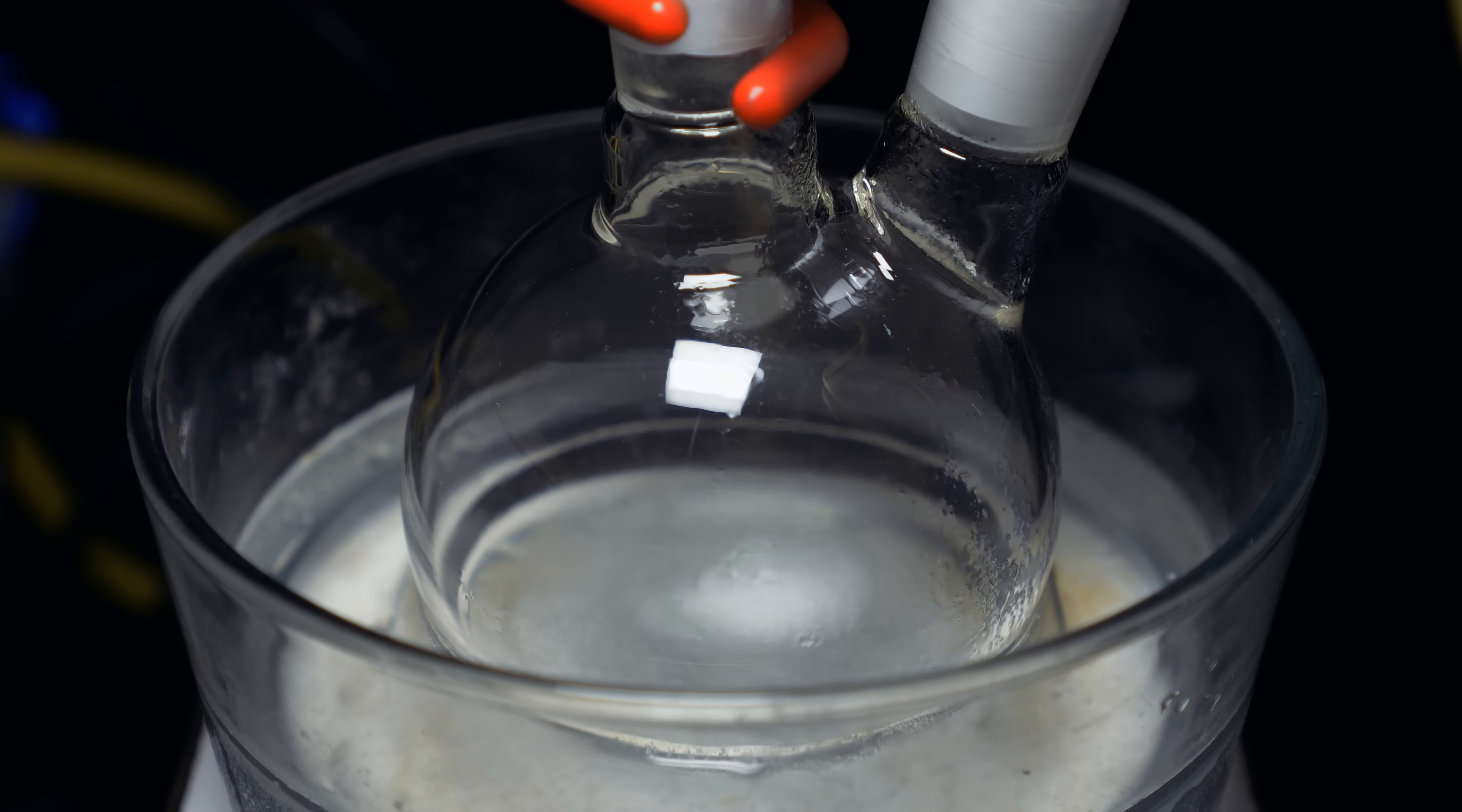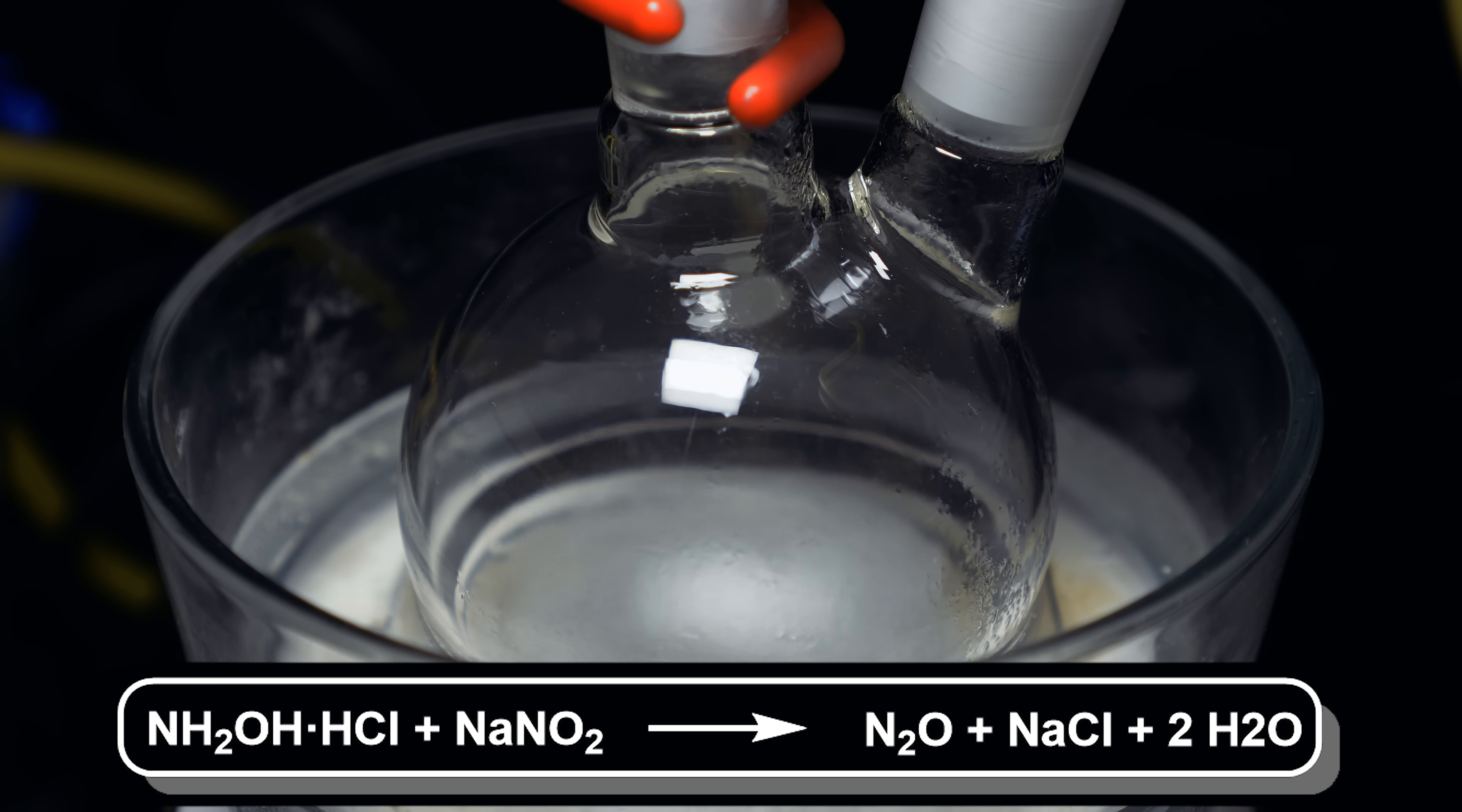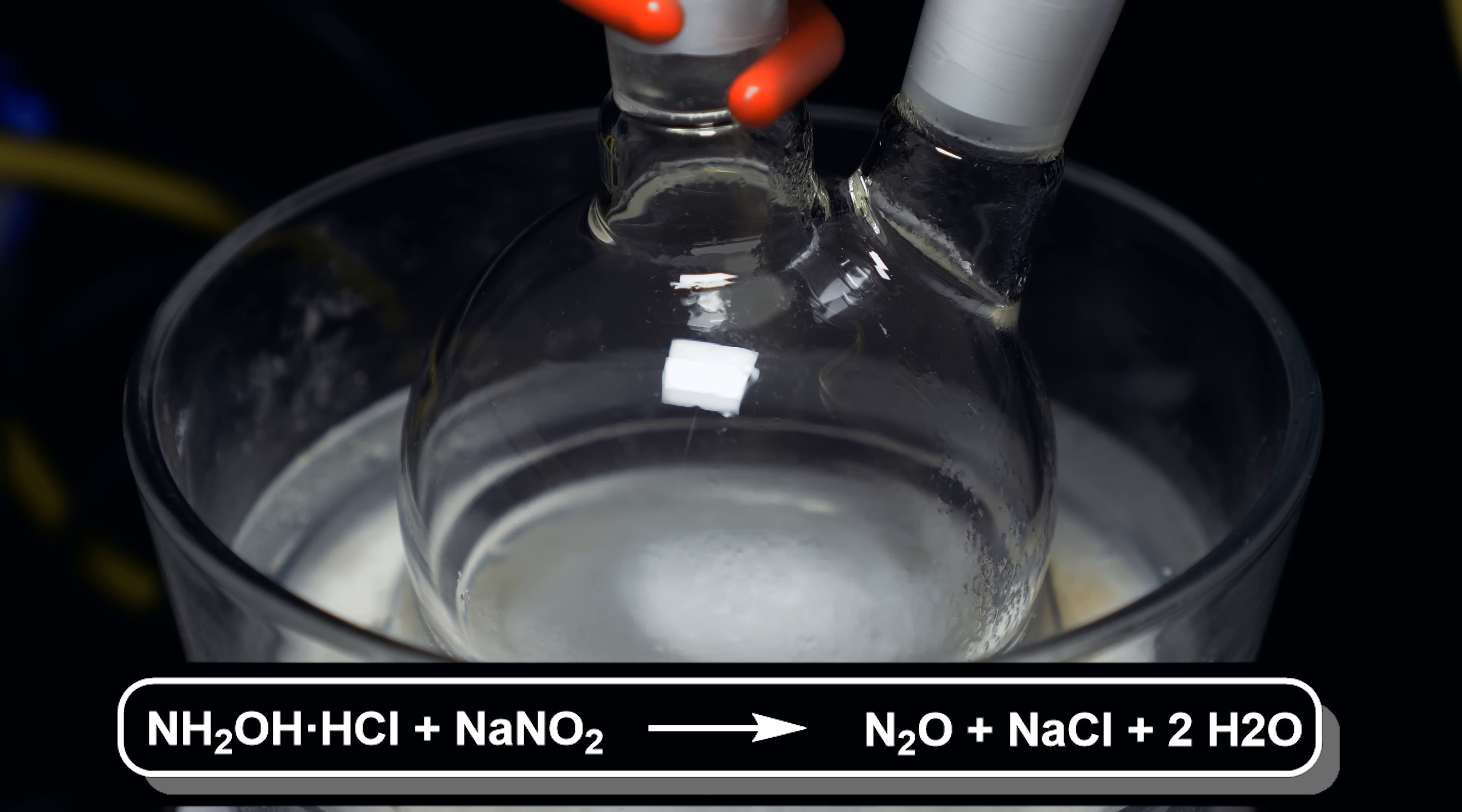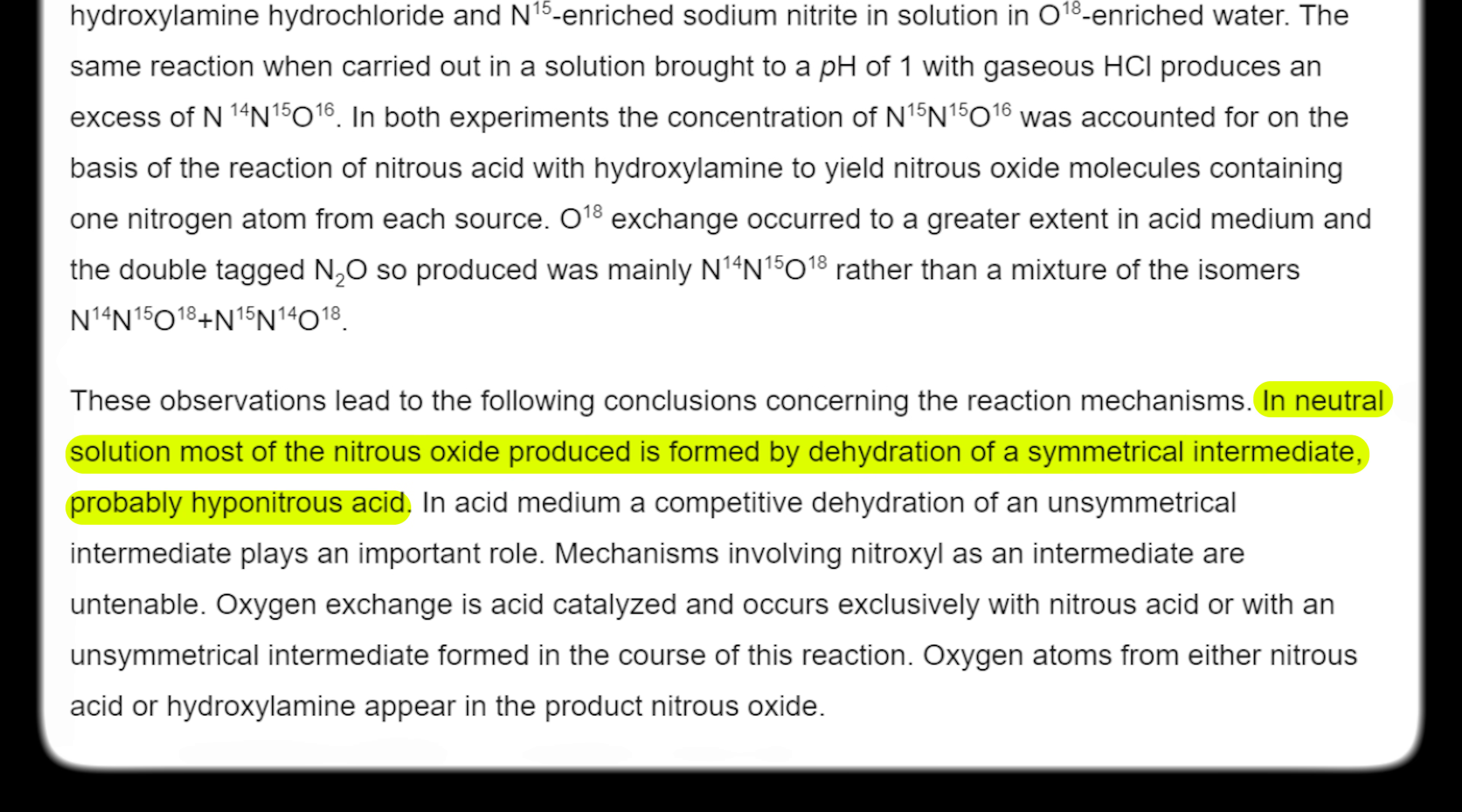Now, let's explain what's happening in this reaction. When the two solutions meet, hydroxylamine hydrochloride will react with sodium nitrite through a redox mechanism where hydroxylamine acts as a reducing agent and nitrous acid, which is formed from the sodium nitrite, as the oxidizing agent. This reaction produces nitrous oxide, sodium chloride, and water. In neutral conditions, which is likely our scenario, most of the nitrous oxide will form from the dehydration of a symmetrical intermediate, which is likely hyponitrous acid. I also did not know this at the top of my head, so when I looked up this paper, I found that it likely was from the dehydration of a symmetrical intermediate. I don't know if this is exactly how it works, but it's kind of a shot in the right direction.